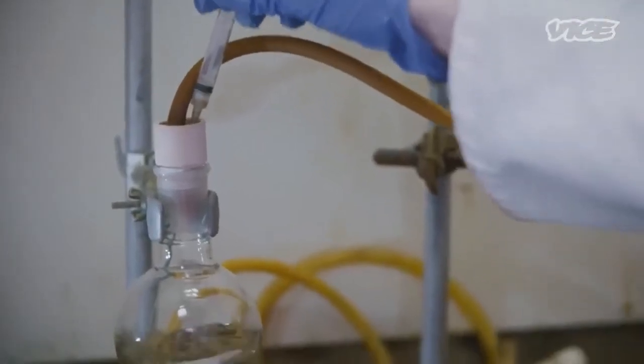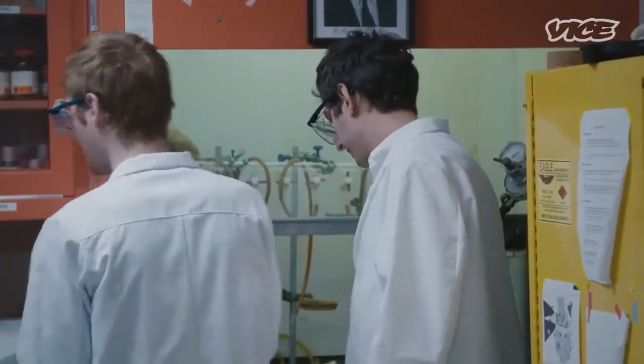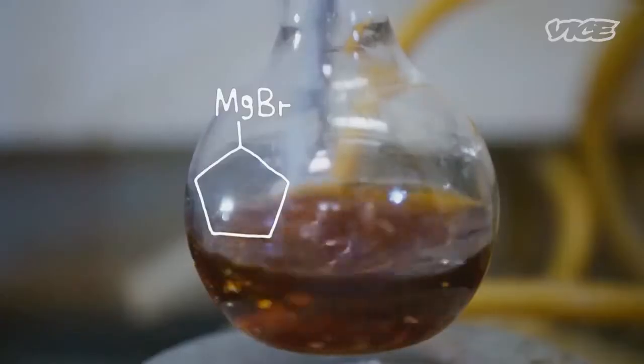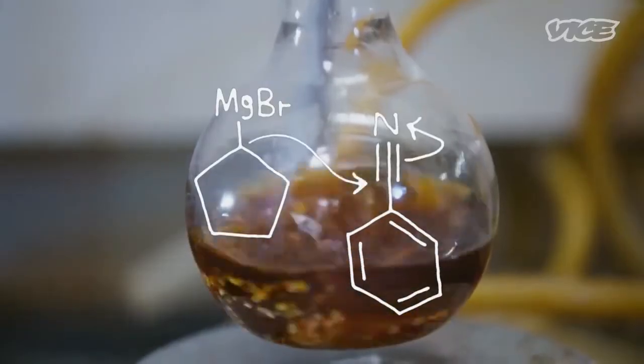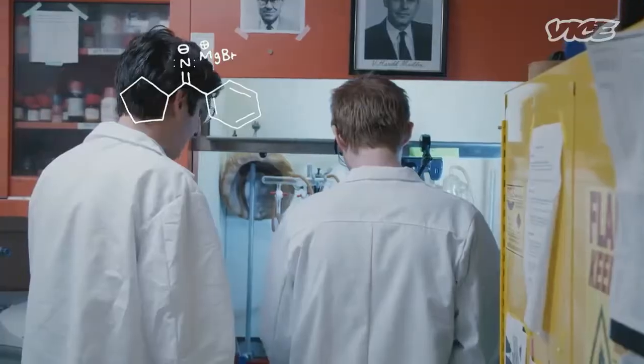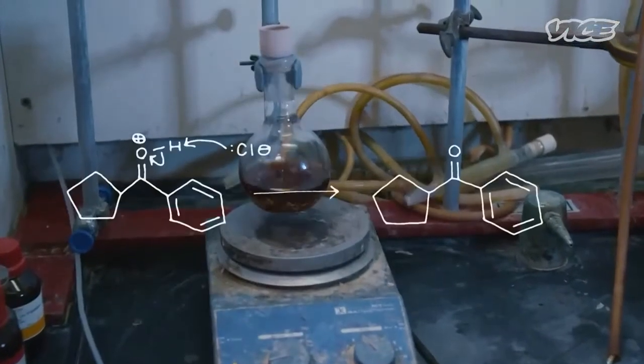Benzonitrile is added to the reaction mix dropwise. Very nice smell. Yeah, it really does smell like almonds. The cyclopentyl magnesium bromide acts as a carbanion, attacking the electrophilic nitrile carbon. And this produces an imine, which is then hydrolyzed to a ketone.